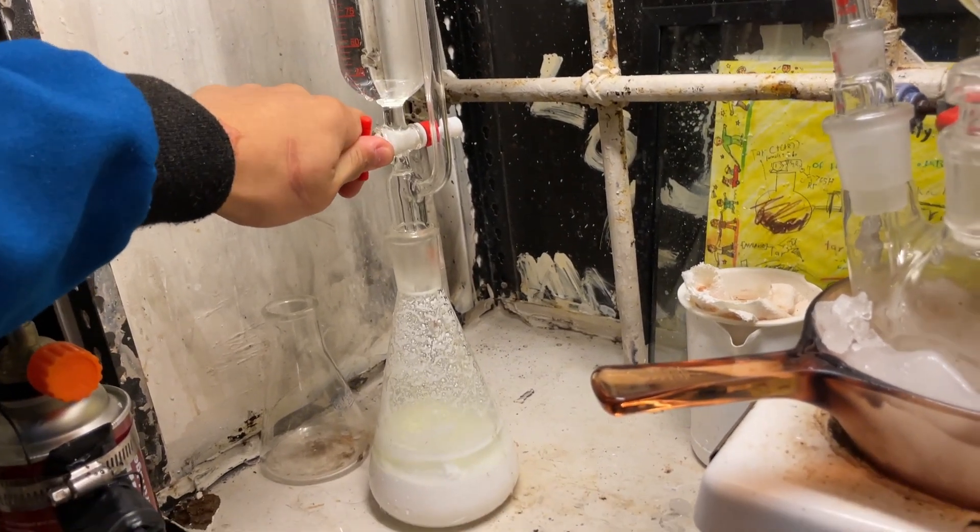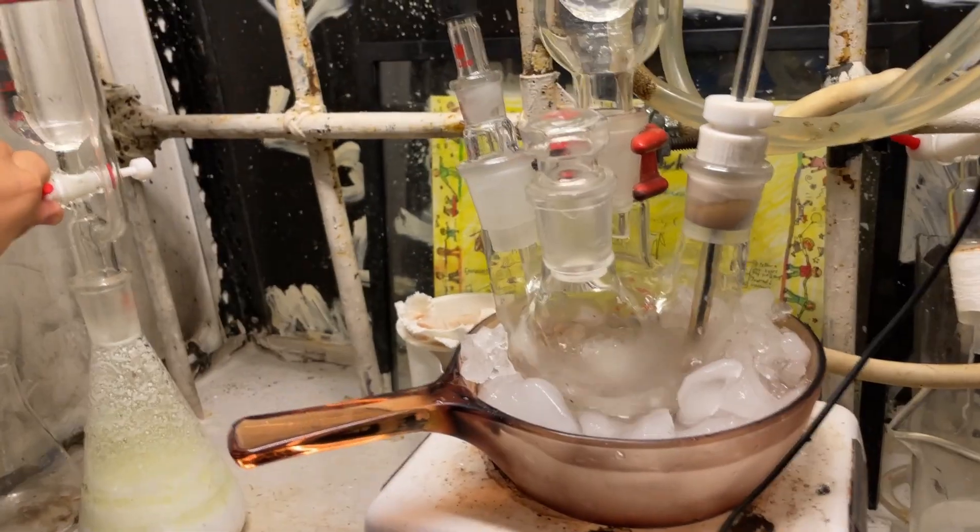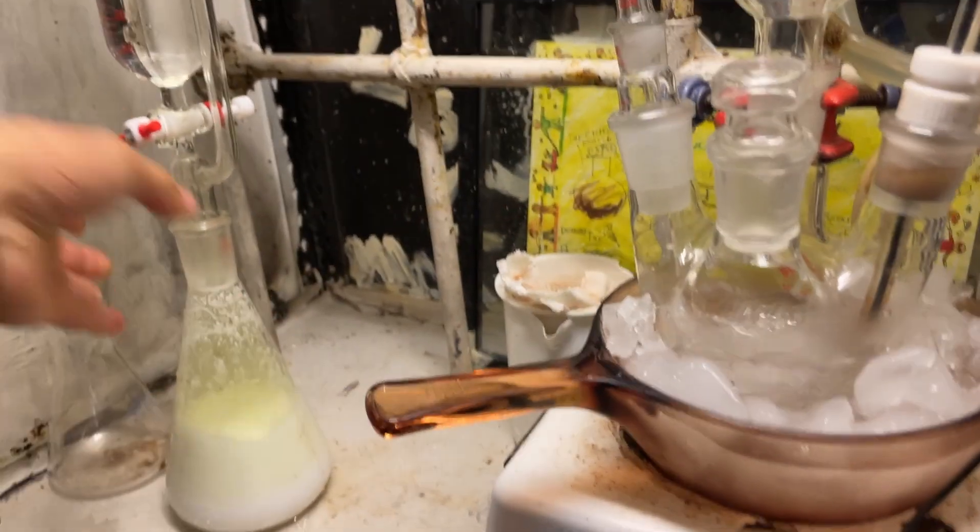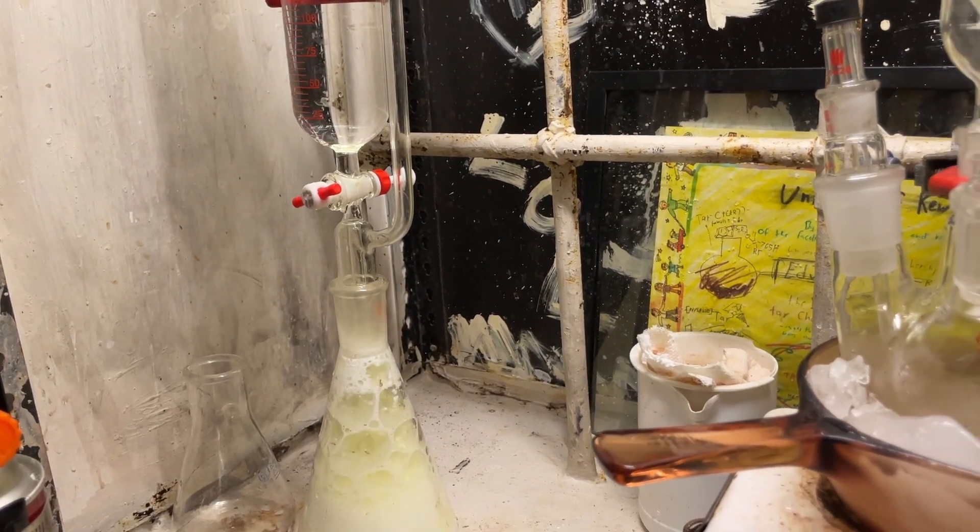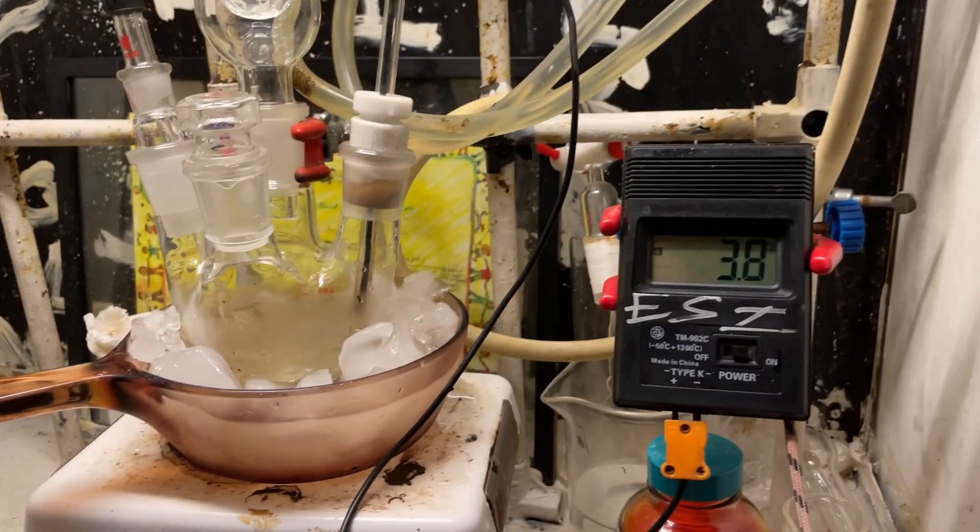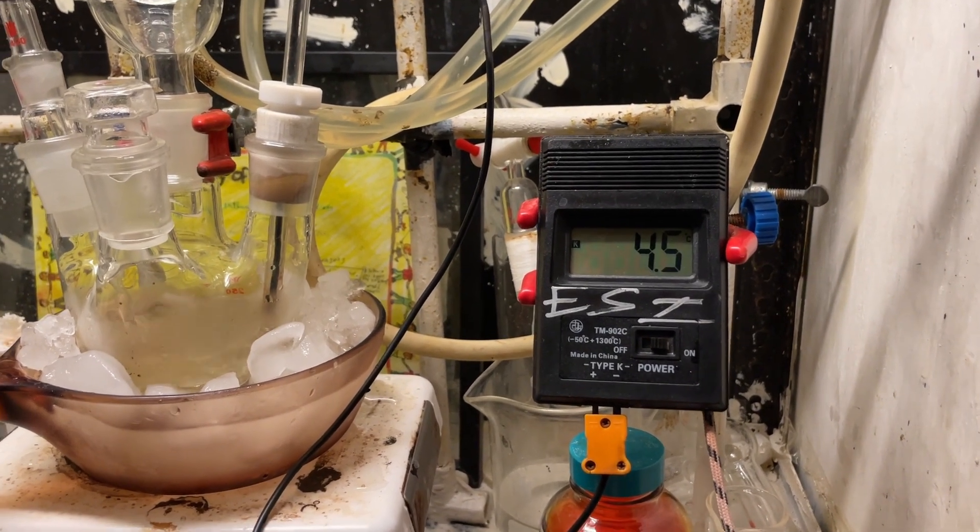Let's start adding chlorine. Yay. Yeah, that's... Yay, it's working.